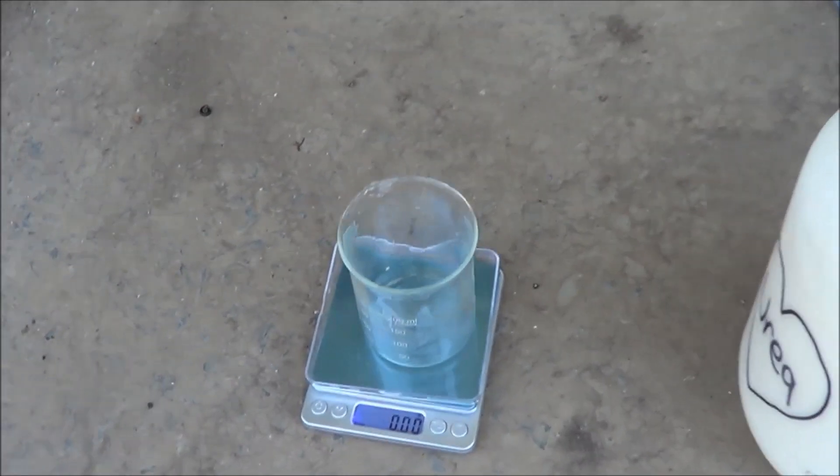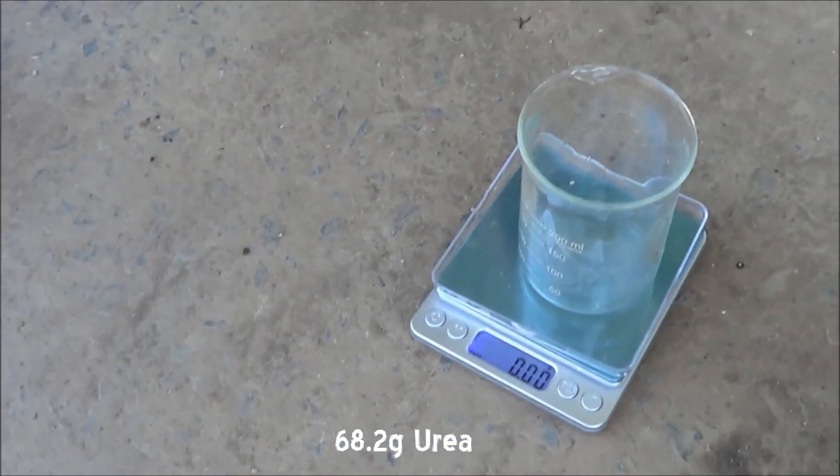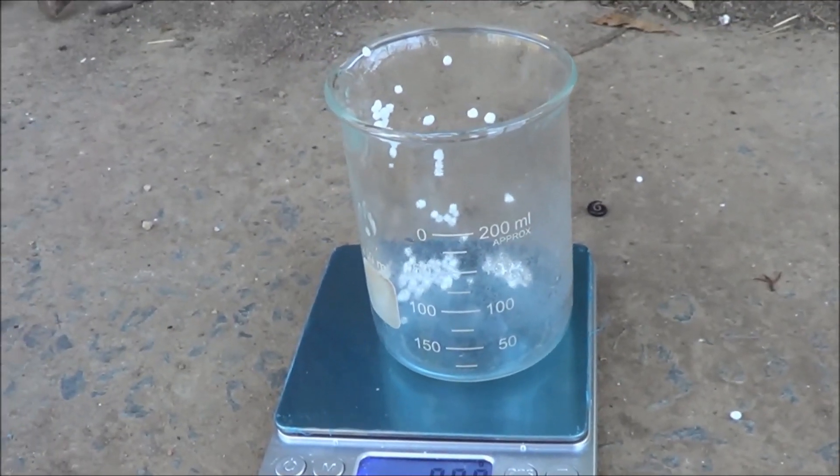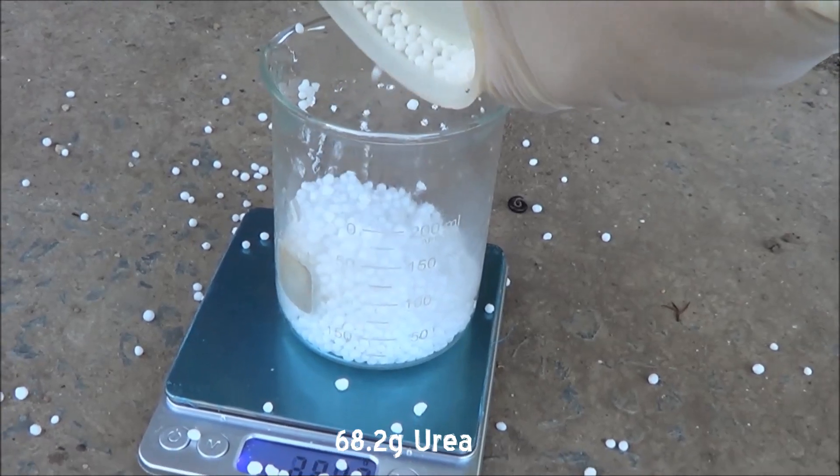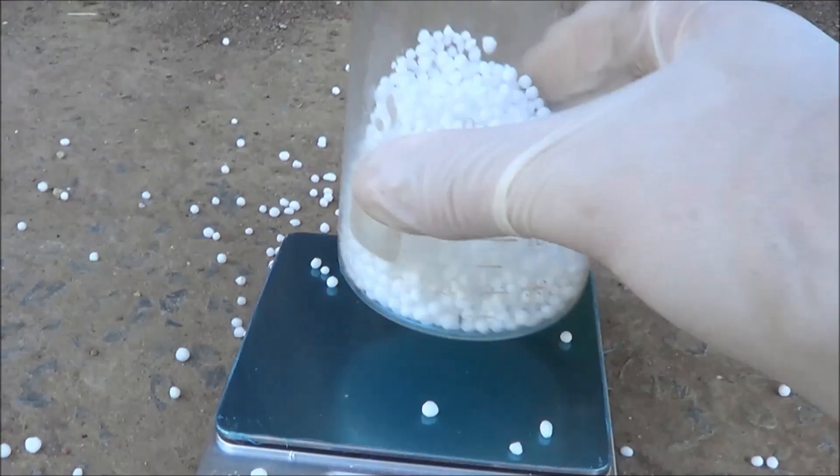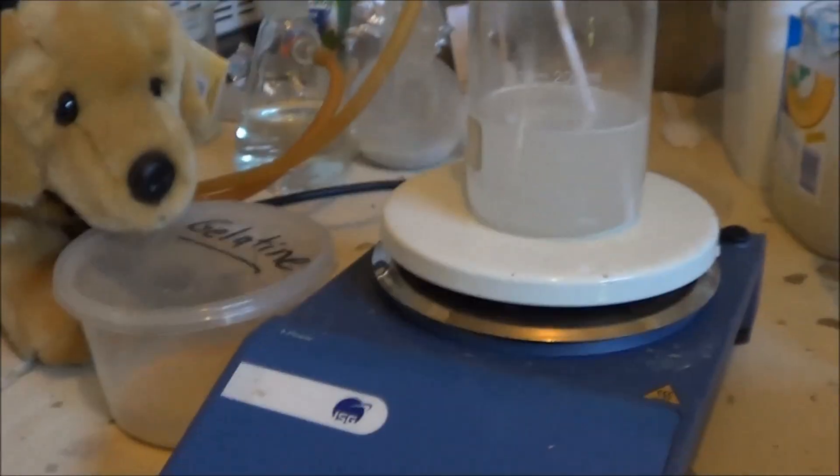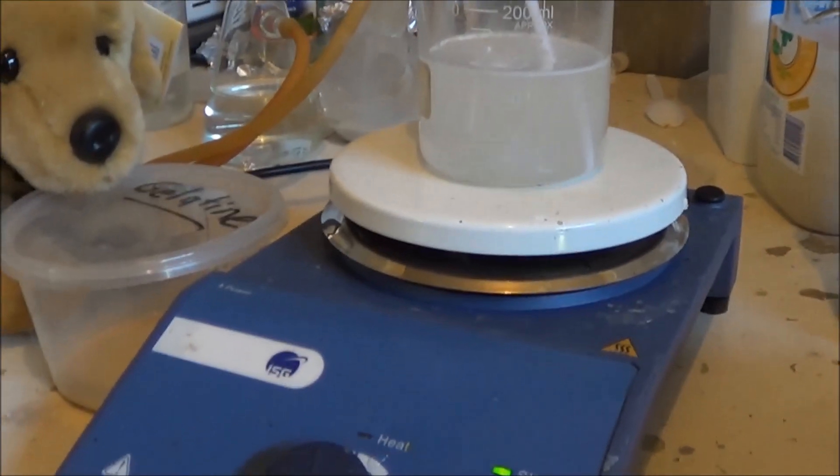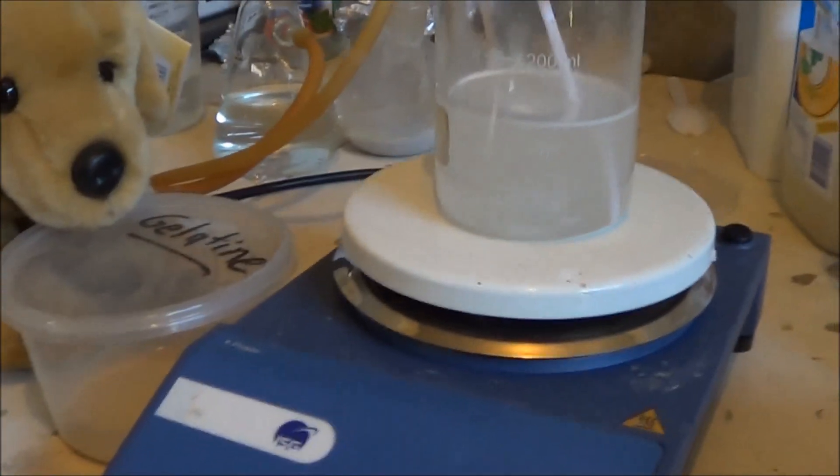Now we're going to need 68.2 grams of urea, which we will carefully weigh out in here. I've got the urea dissolving in about 60 mils of hot water. Even if you add really hot water to it, you're going to have to heat it up to get it all dissolved because the urea dissolving is very endothermic.